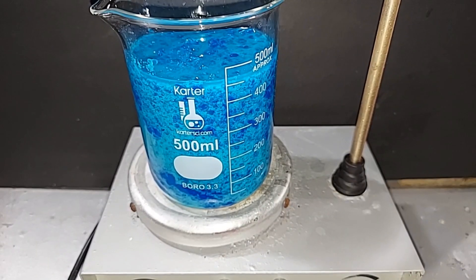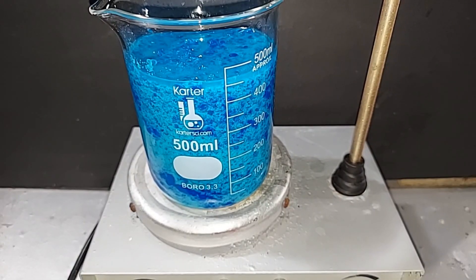I'm done. I'm going to turn this down — there is a lot of mushy solid in there. I'm sure once it dries out it won't be nearly as much as what it looks like right now. So let's filter it next.